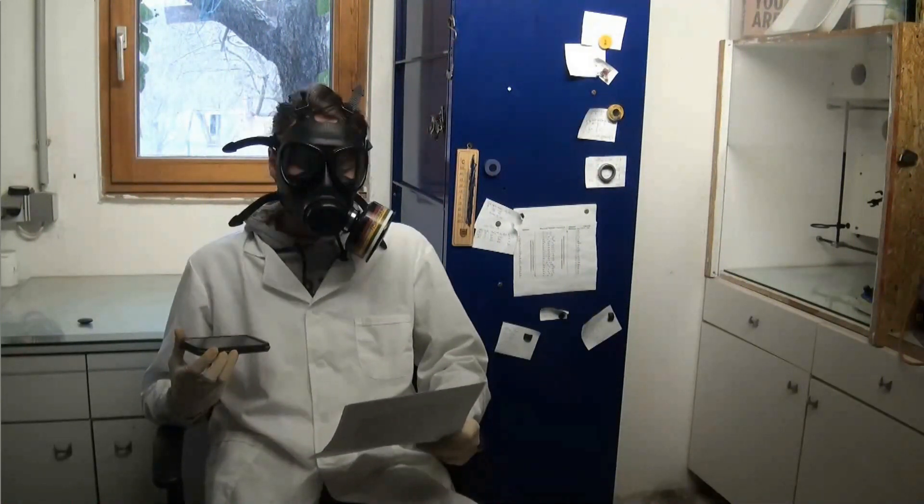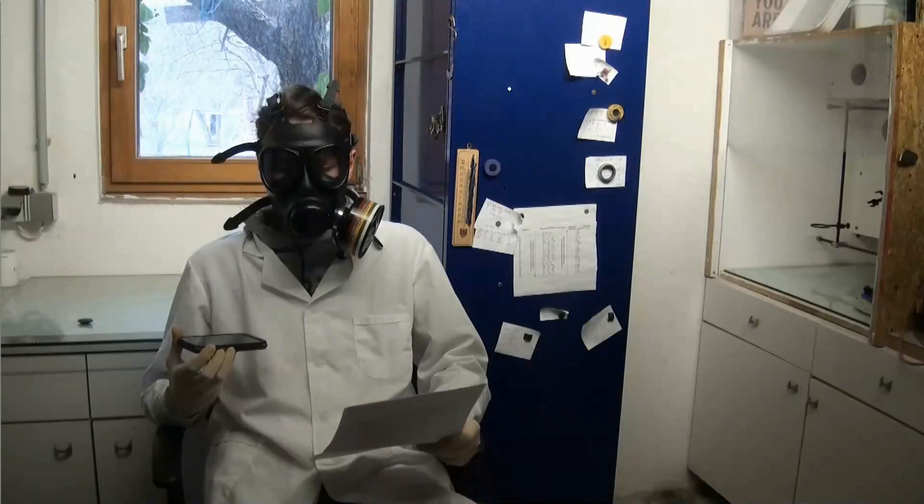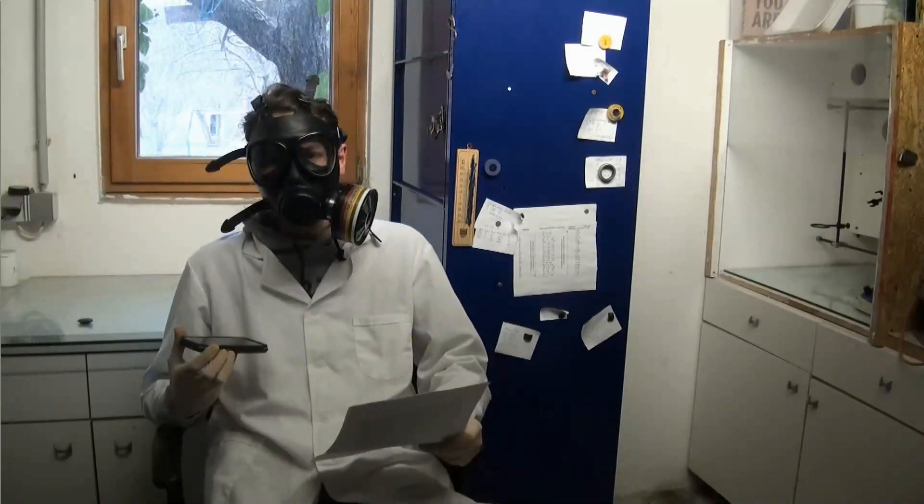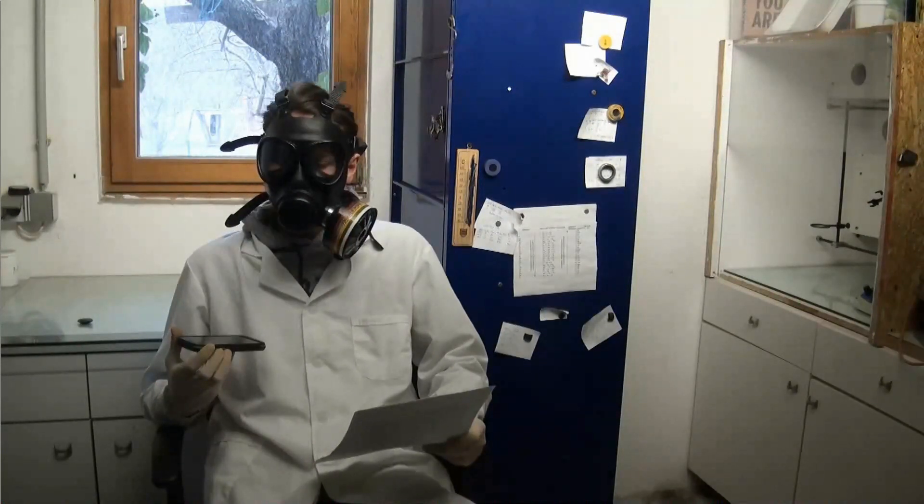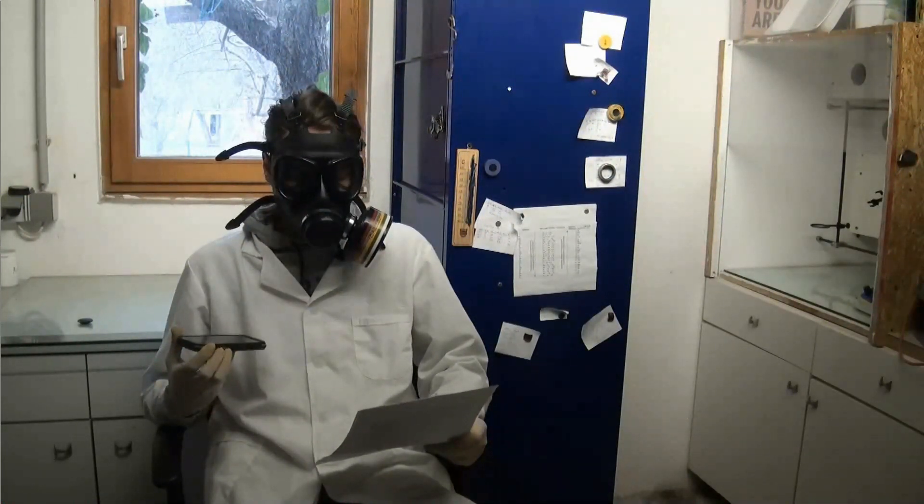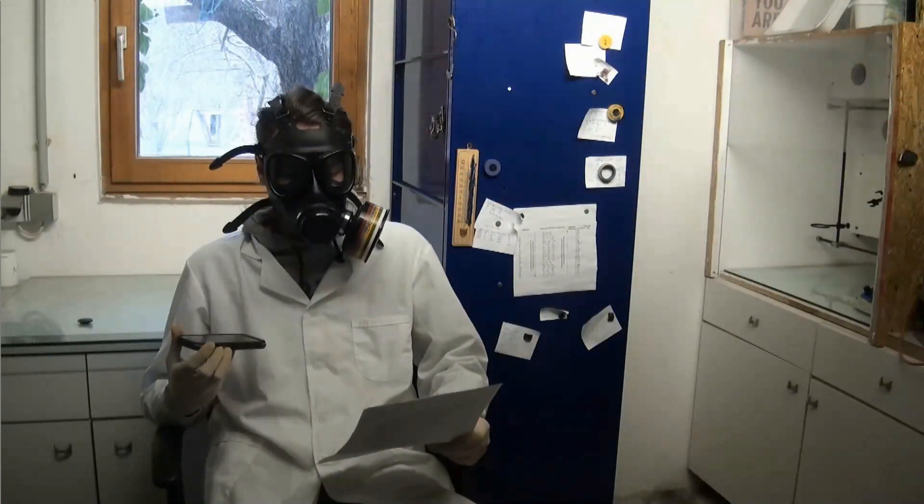A normal way to do this for a hobby chemist would be mixing a nitrate salt with sulfuric acid. Sadly, sulfuric acid is no longer accessible for normal people in the EU, so I had to look for alternatives.